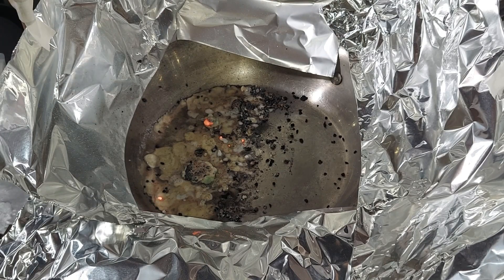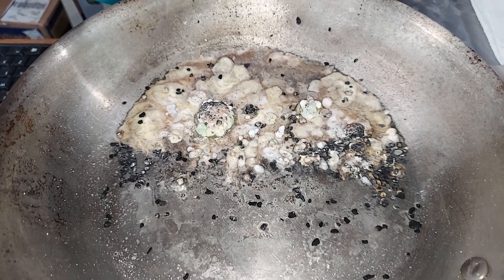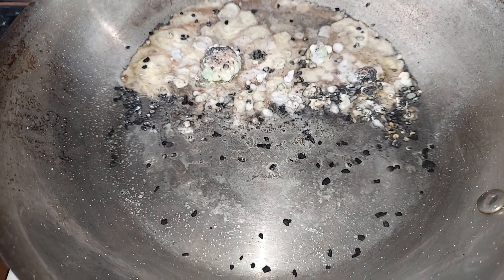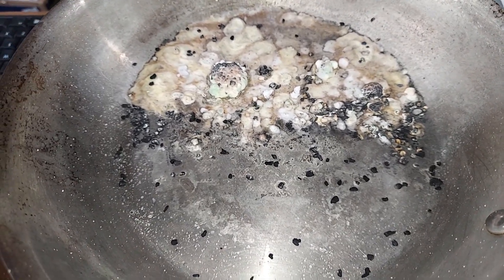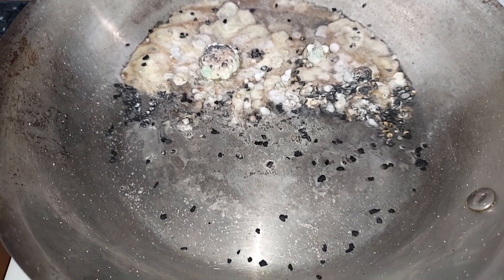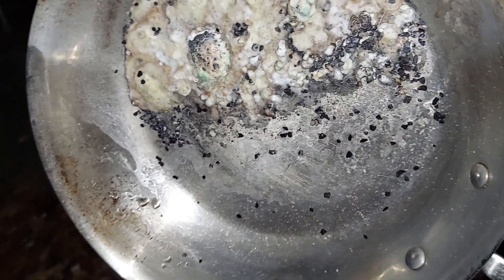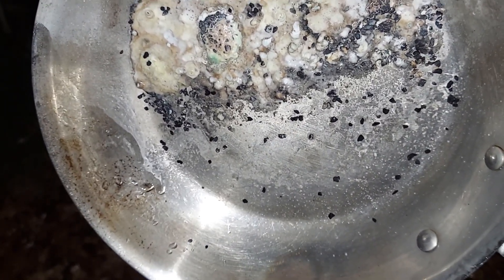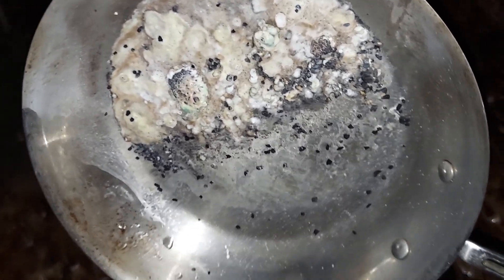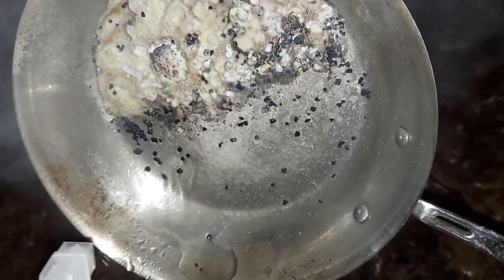Looks like a mess, but hidden in that mess is our sodium nitrite. Here it is cooling. You can hear it cracking as it cools off sometimes. What I'm going to do is wash out the stuff closest to me with water — just spray it with the pan on the side to get rid of any sodium nitrate that was not converted. Where the sodium nitrate was spread pretty thin on the bottom of the pan, I'd venture to guess it did not convert. So I'm going to spray along there to dissolve it, still kind of hot but that's all right.